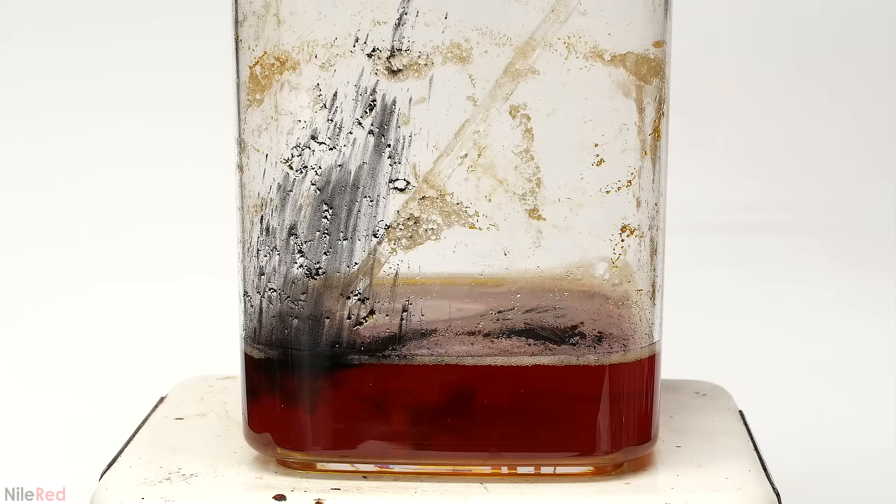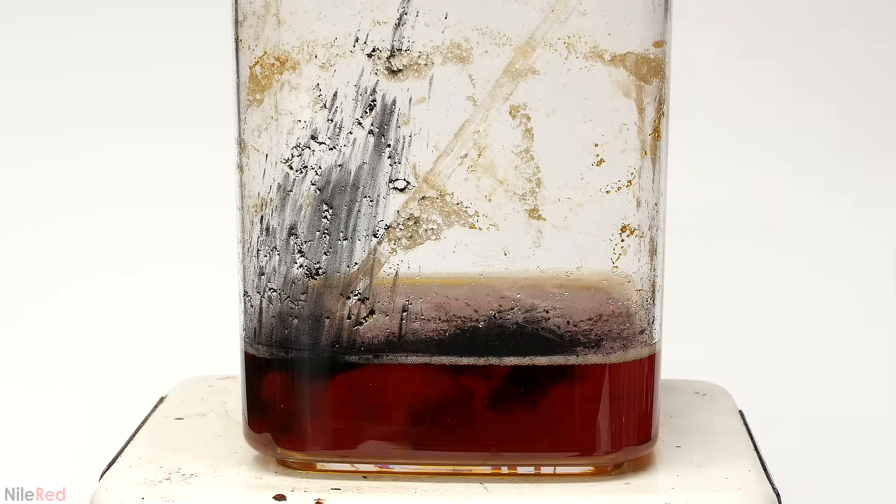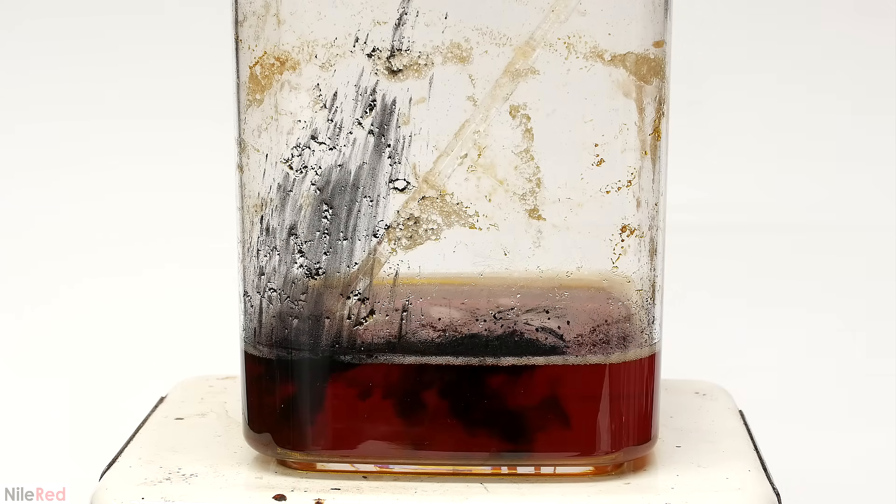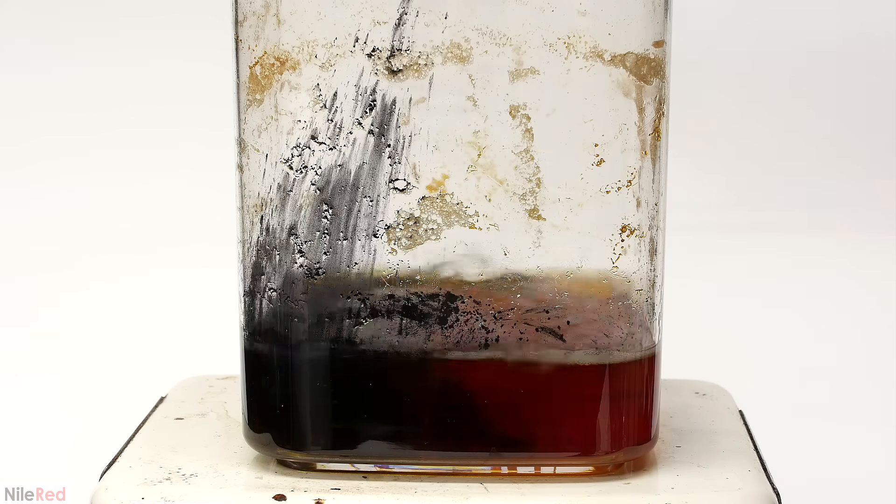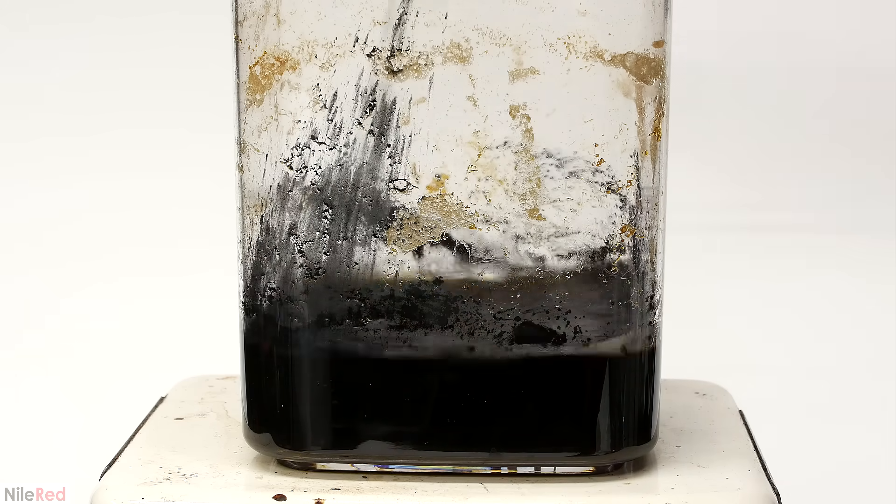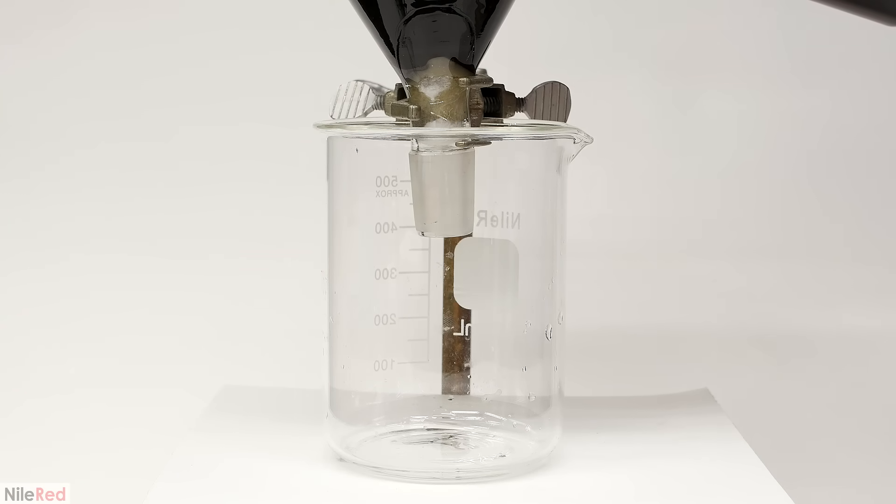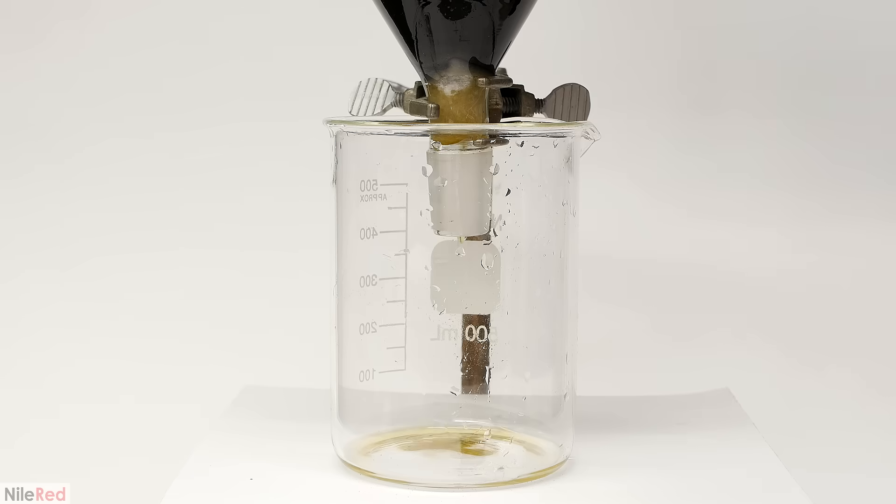The urea that forms quickly dissolves, and I'm eventually left with a nice and clear solution. It's still really discolored though, so I tried seeing if activated charcoal would help. It usually works pretty well, so I mixed in a small amount. Then, to get rid of the charcoal, I filtered it through some cotton and Celite.